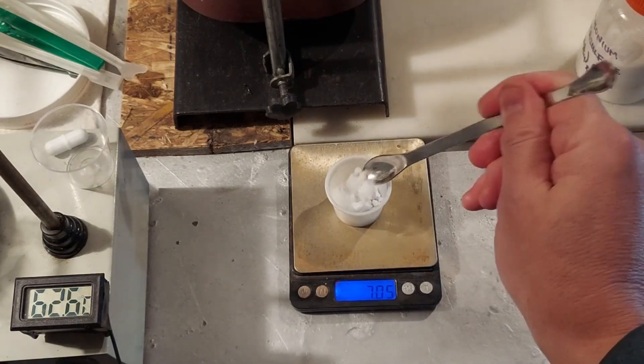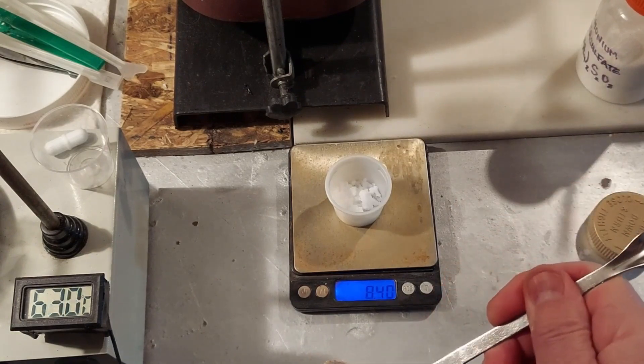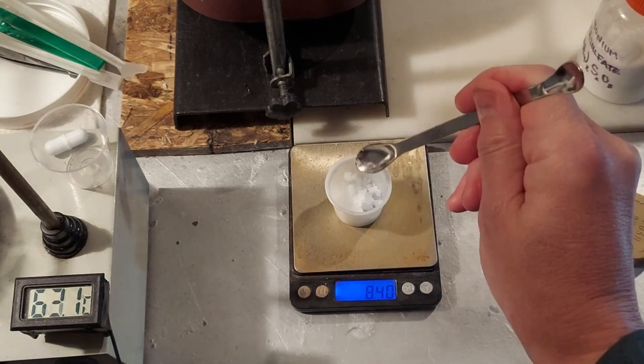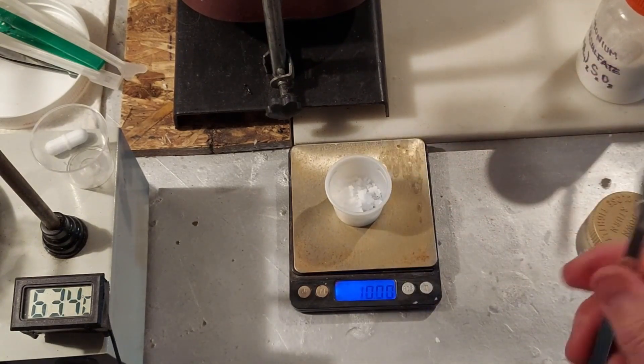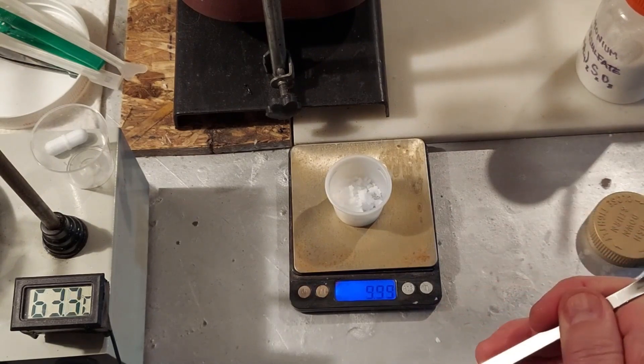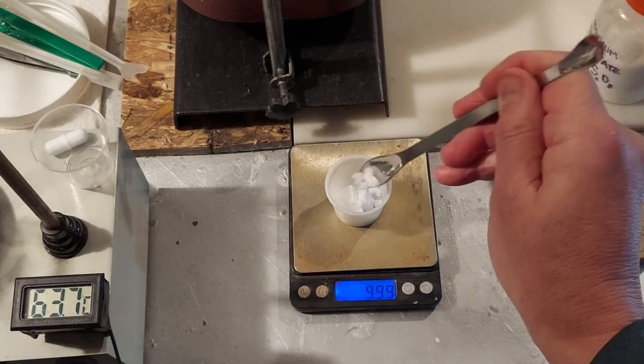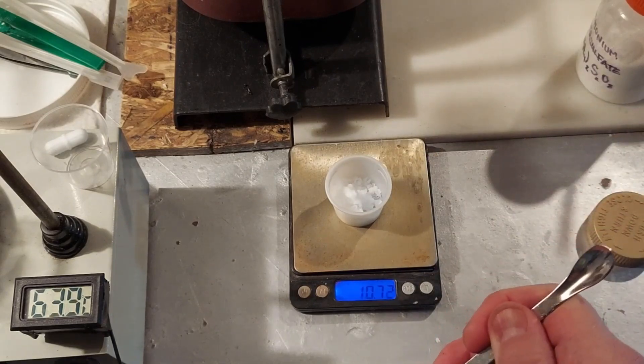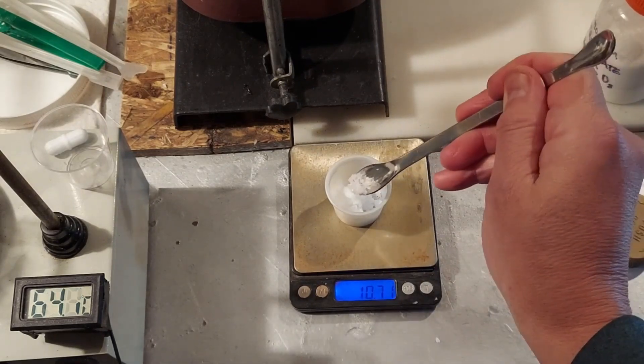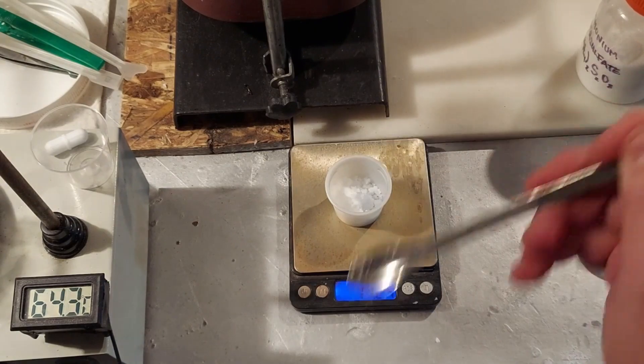Again, this is a recipe, honestly, that I kind of came up on my own, putting together a few of the articles I read. But I could not find a straight up, you know, you do X, then you do Y, then you do Z. So this does work. There might be a better one out there, but this one definitely works.